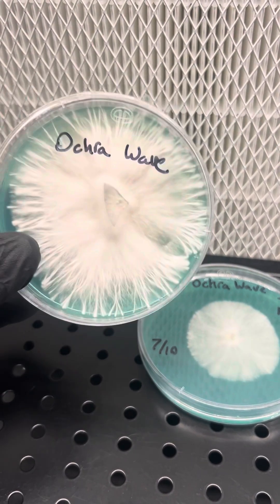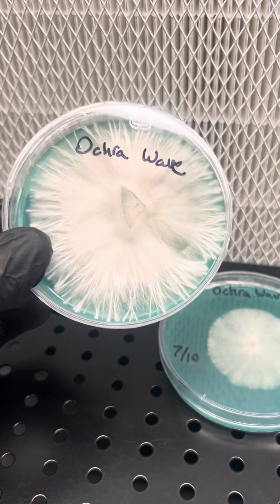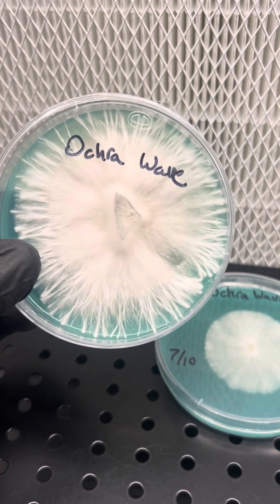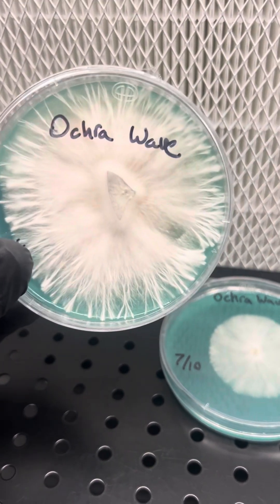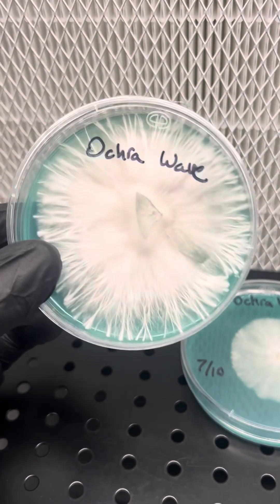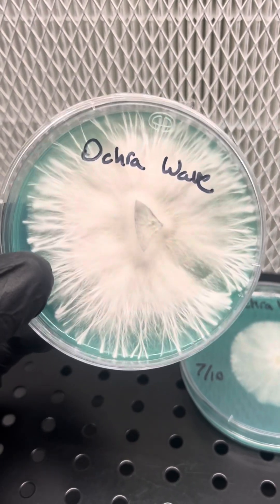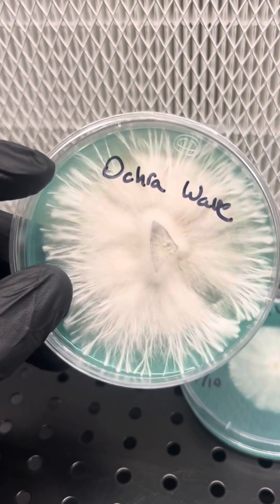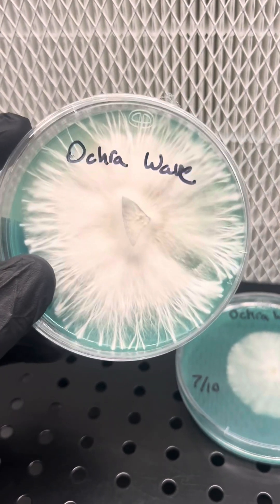When it comes to mushroom cultures, when you get cultures from vendors, a lot of the time they're already isolating them. A lot of vendors do a great job. But sometimes you will get a culture from someone and it's kind of slow, kind of weak. Taking agar transfers to new plates and chasing fast and aggressive growth is a way you can isolate that culture.